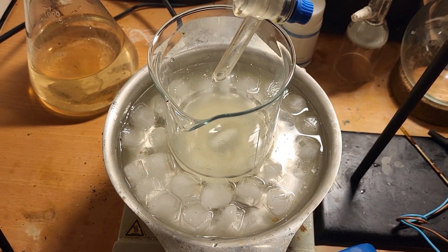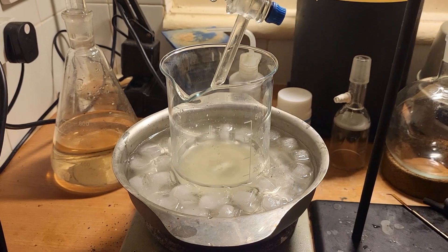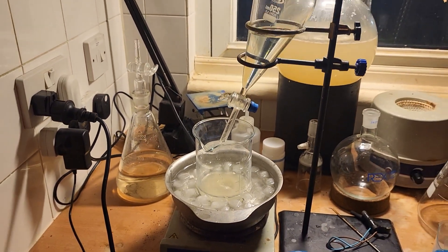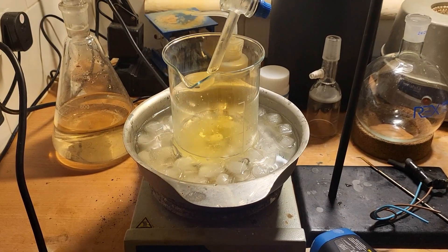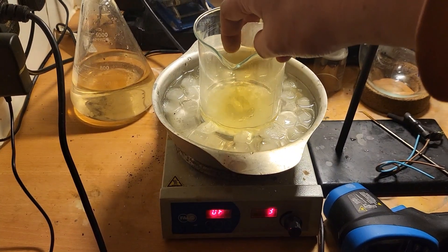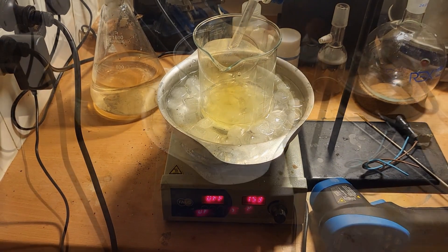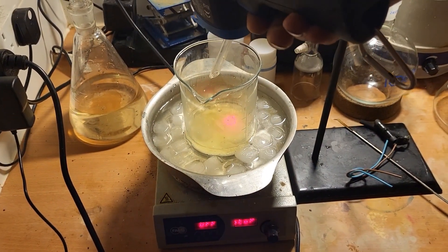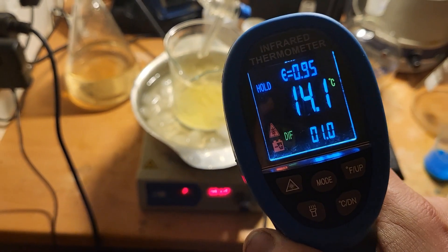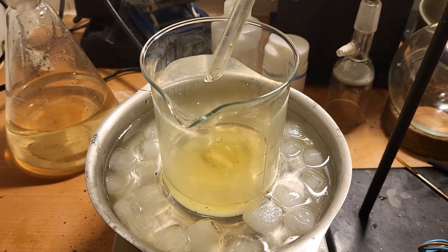Slow addition. Should be good. You can see the yellow gas. It requires low temperature, so add an ice cube. Now at 14 degrees, with the addition running as slow as I could get it.